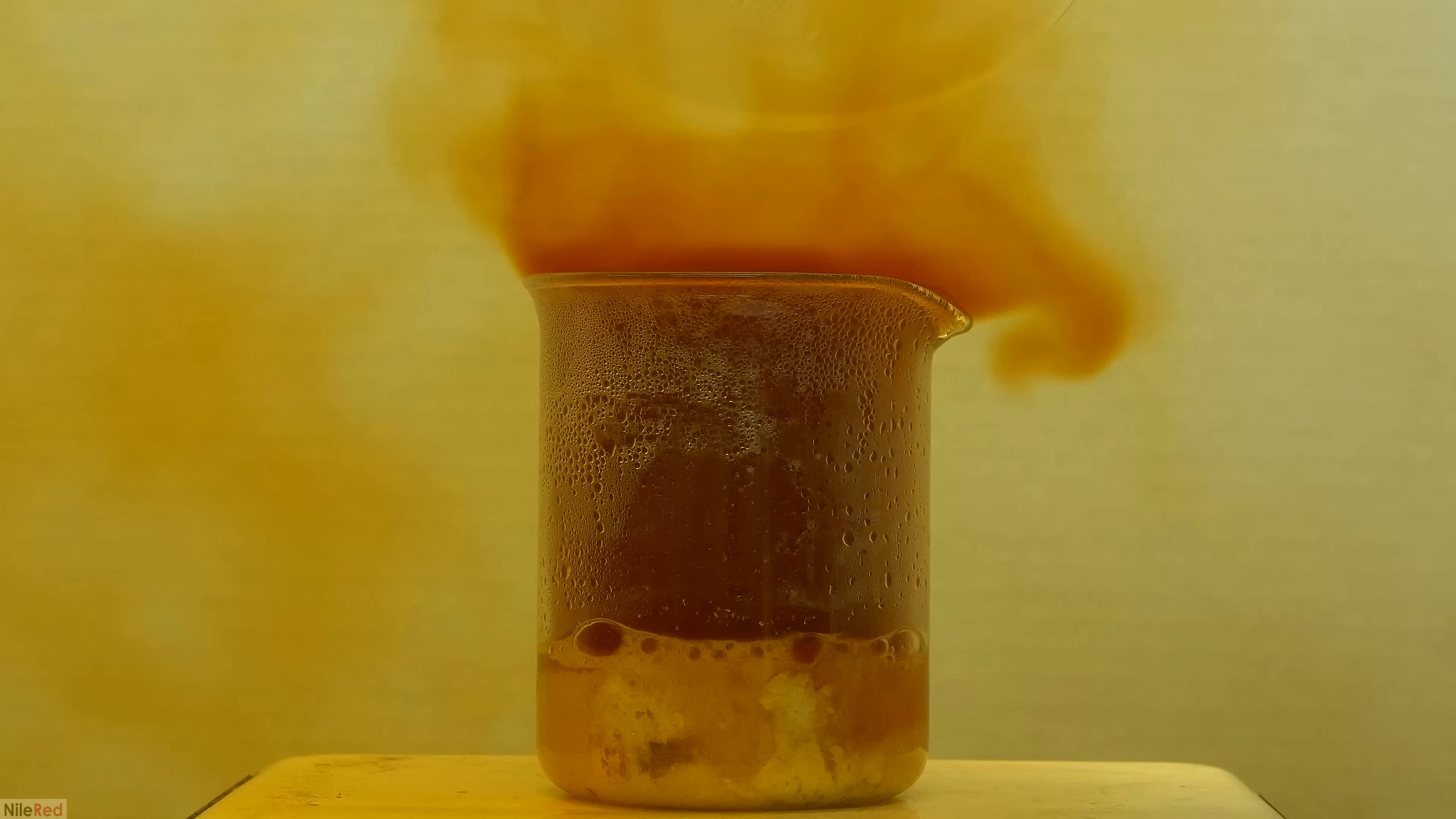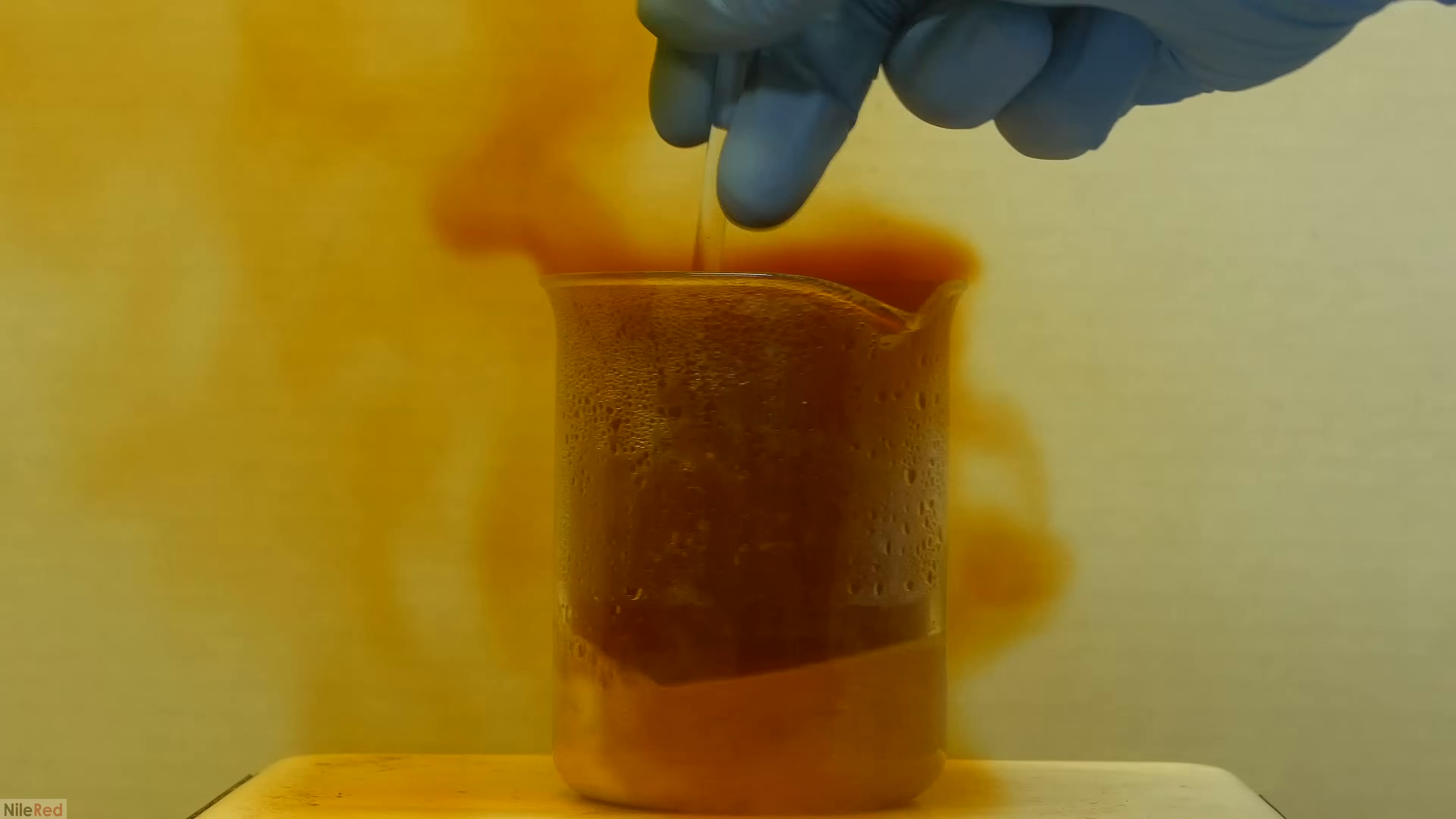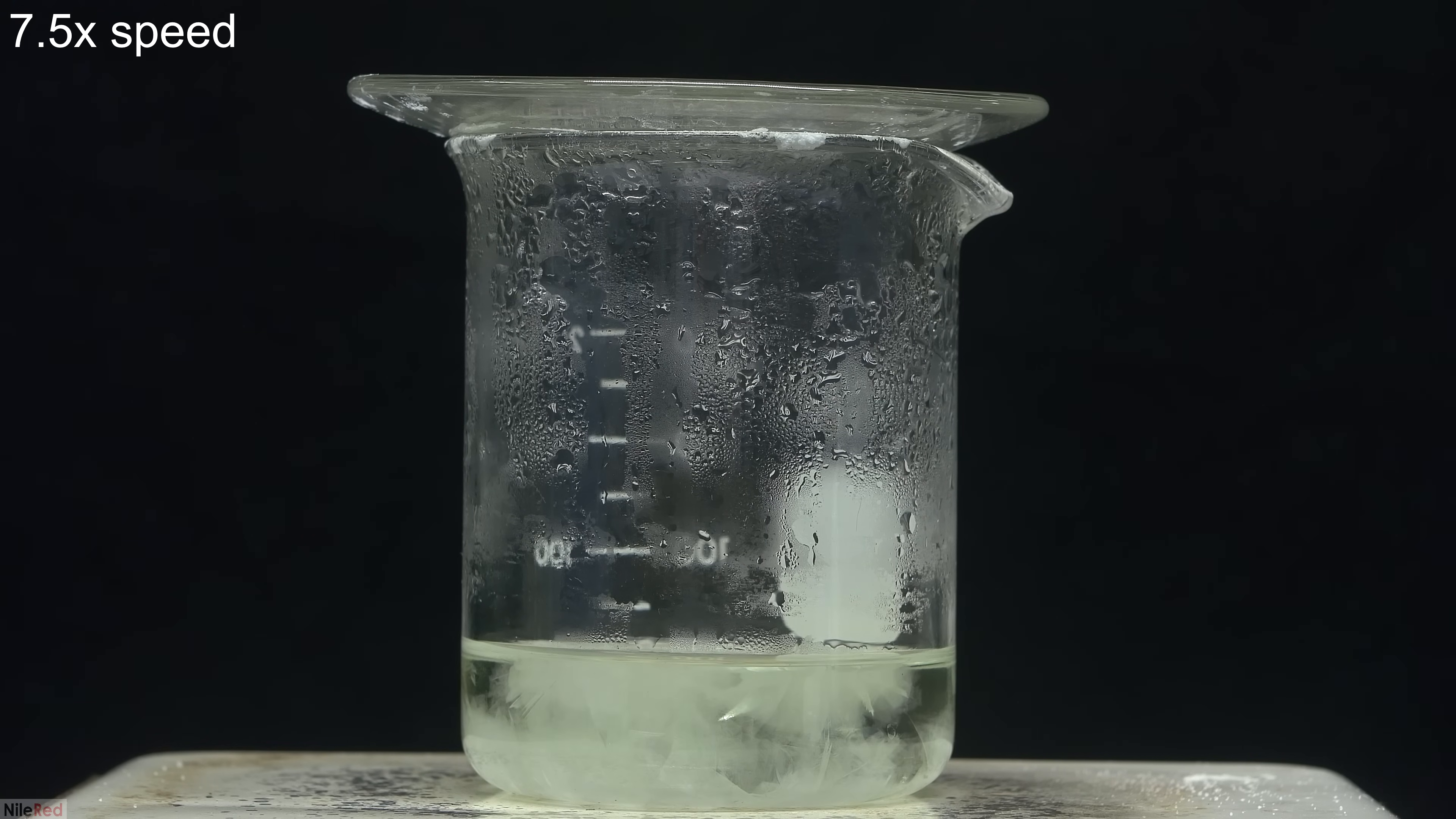In general, the process to make silver nitrate is pretty simple. The first thing we do is react silver metal with nitric acid to make a solution of silver nitrate. The water is removed by evaporation and this leaves behind our silver nitrate.